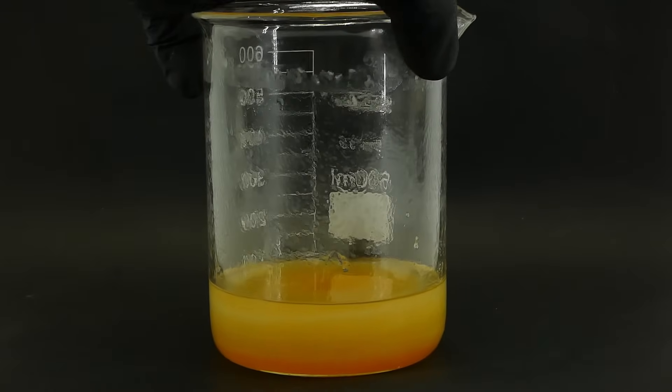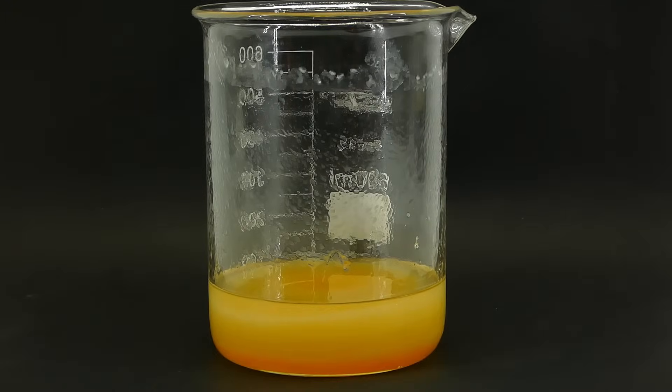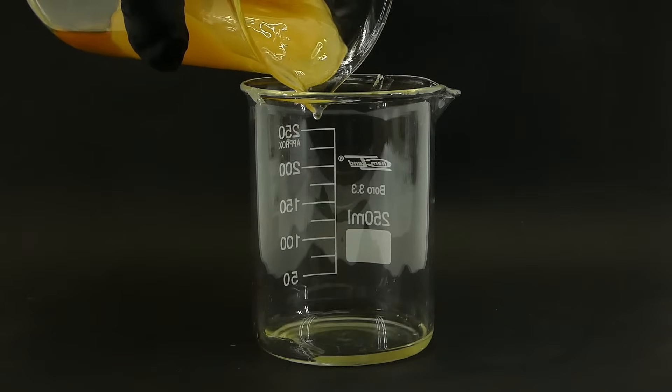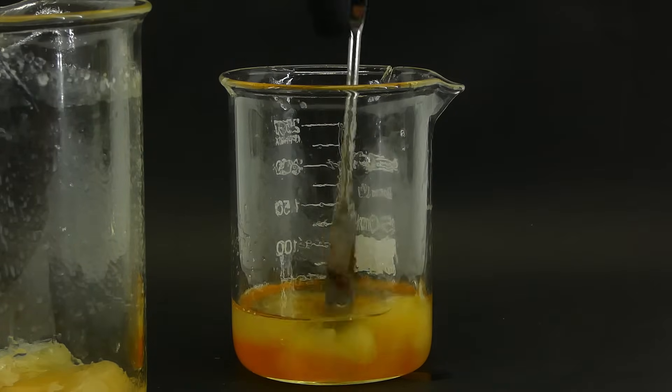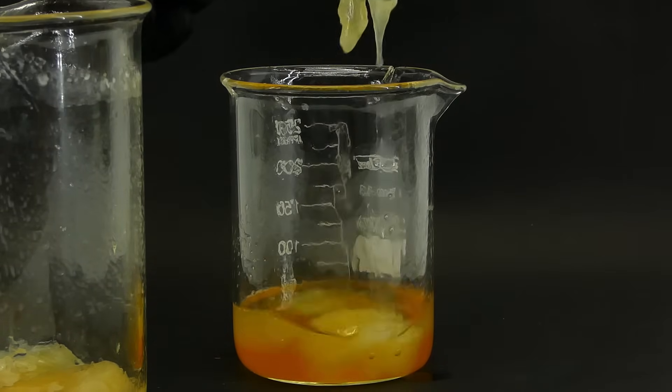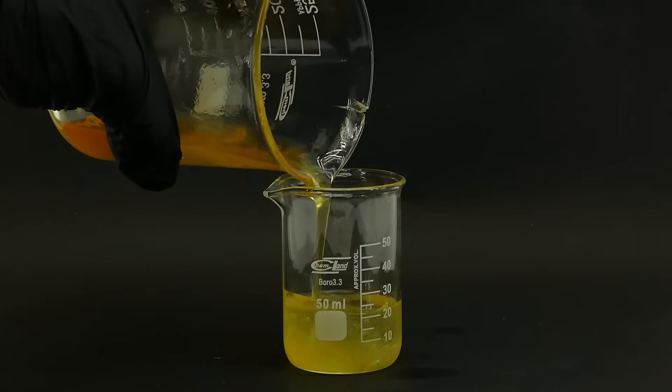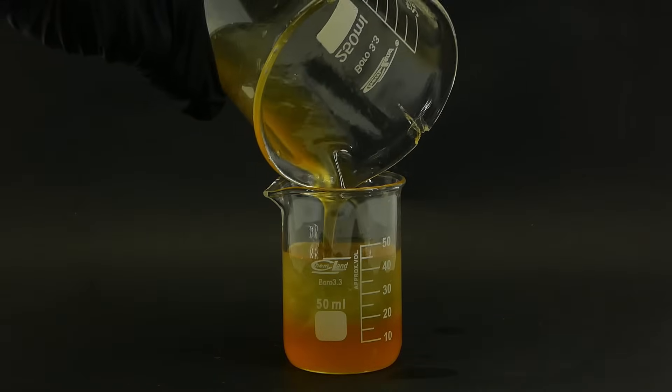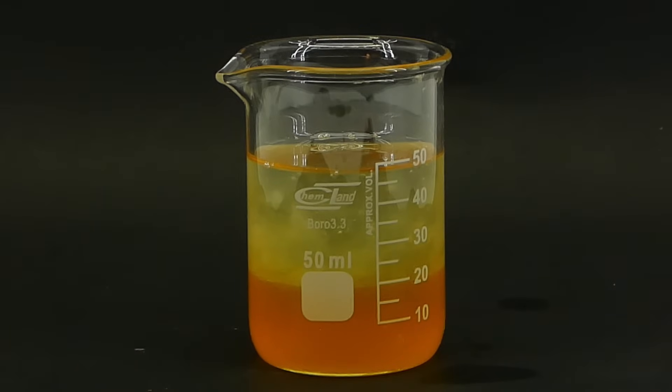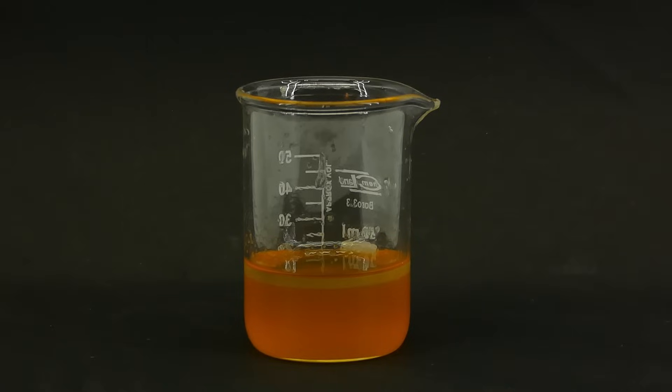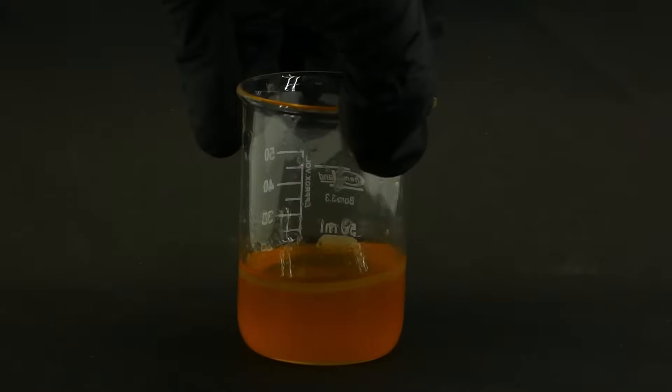It is still mixed with a lot of the gelled biodiesel, and to remove it, I transferred everything into a smaller beaker, and tried to scoop out some of the gel using a spatula, which worked only to some extent. When most of it was gone, I poured the mixture into an even smaller beaker, and I could now see two distinct layers form. I decanted off the upper one, which was still the biodiesel, and I was now left with some very crude glycerin.